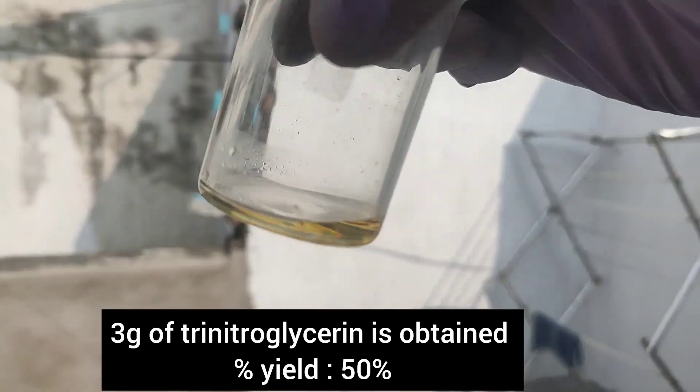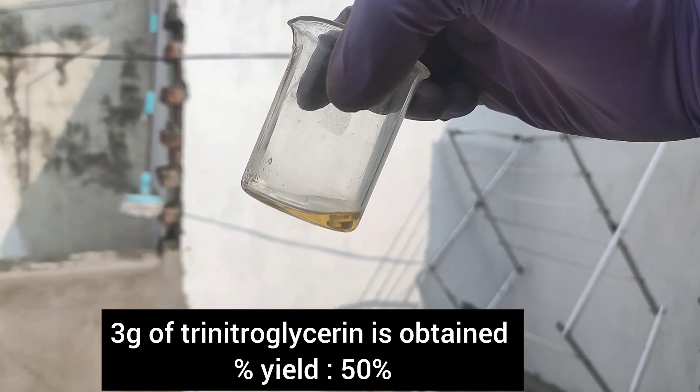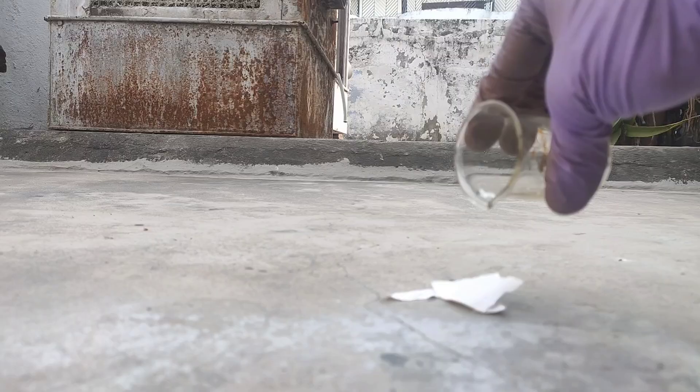After taking the weight of empty beaker, I got to know that I had made 3g of trinitroglycerin which corresponds to a yield of 50%, which is not bad if you look at the reagents that I have used.